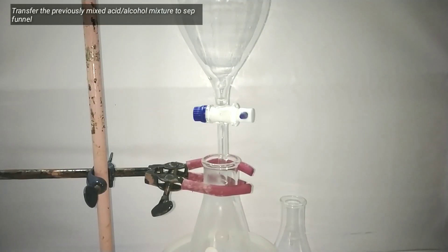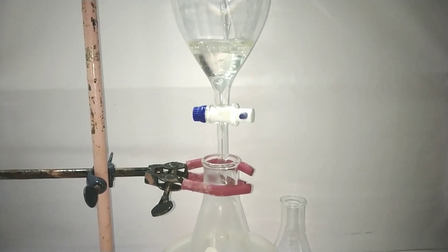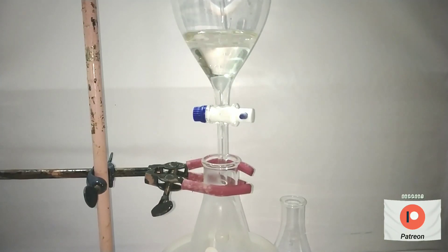Now we transfer the previously mixed cold acid alcohol mixture to the separatory funnel. In the Erlenmeyer flask below, we have the sodium nitrite solution.